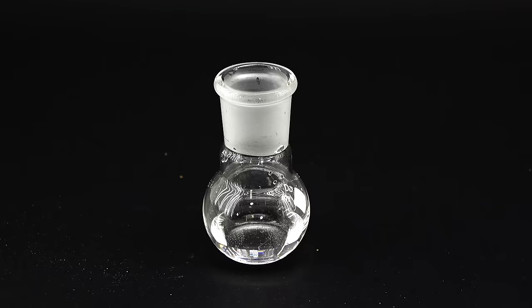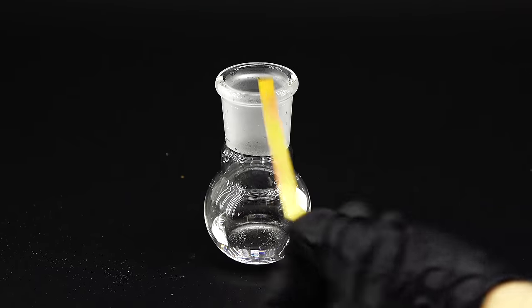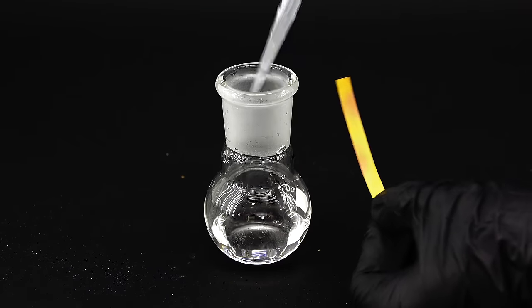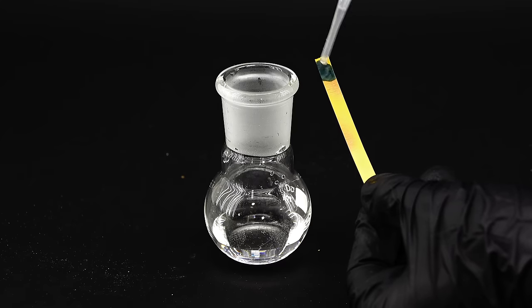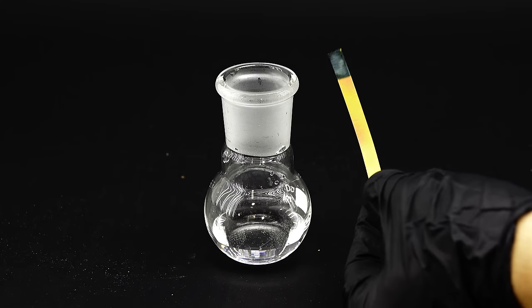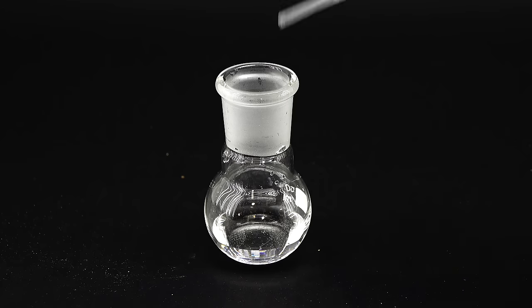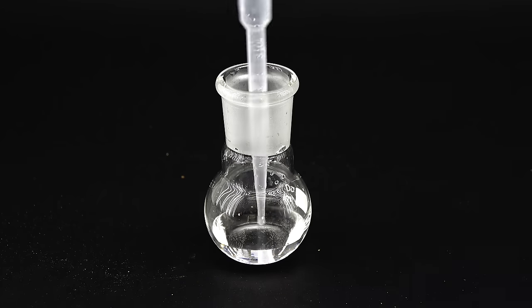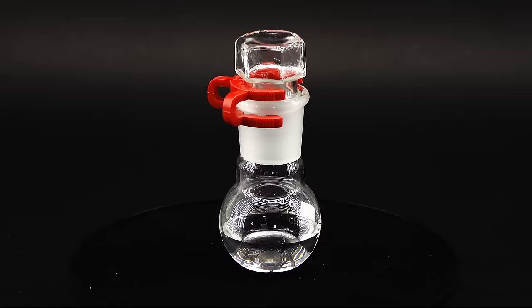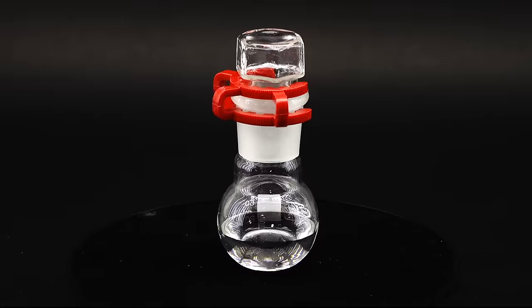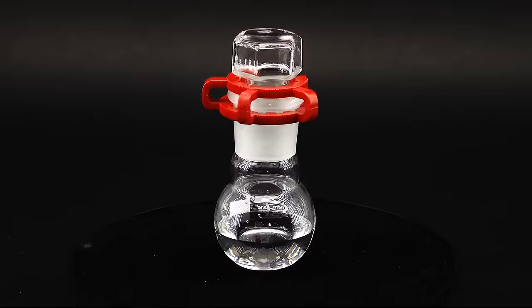Anyway, as the first experiment with my product, I wanted to demonstrate hydrazine's basicity. Upon contact with a pH paper, you can clearly see that it is quite basic, much like ammonia, and this property makes it suitable to form adducts with various acids. In terms of appearance, it looks just like some innocent water. However, when it comes to its reactivity, it's the opposite of innocent.